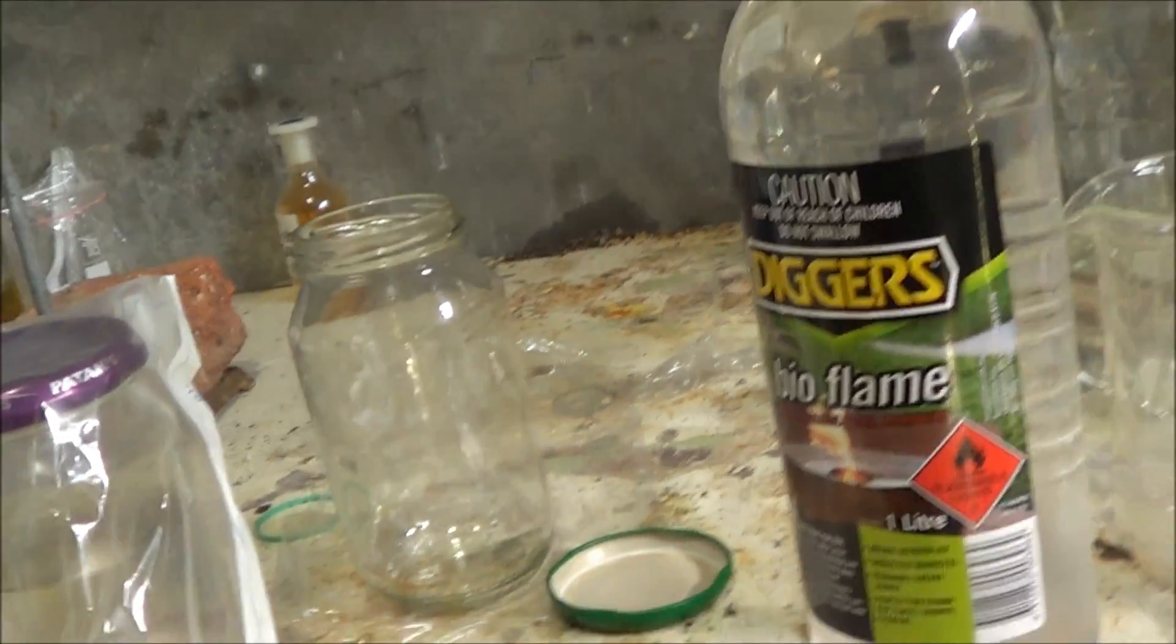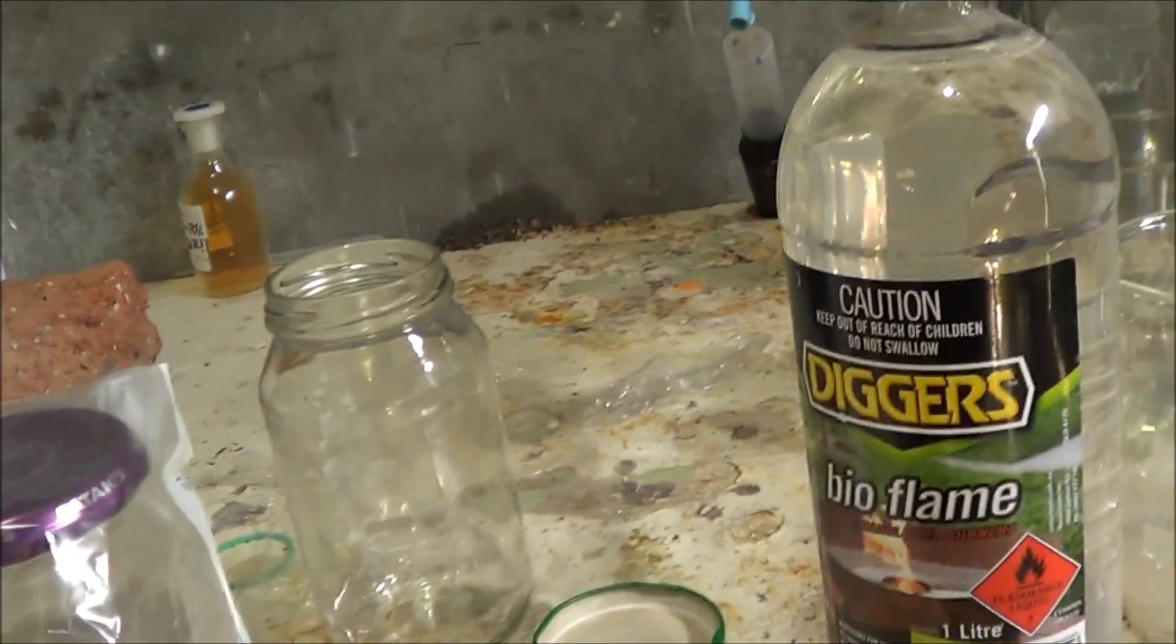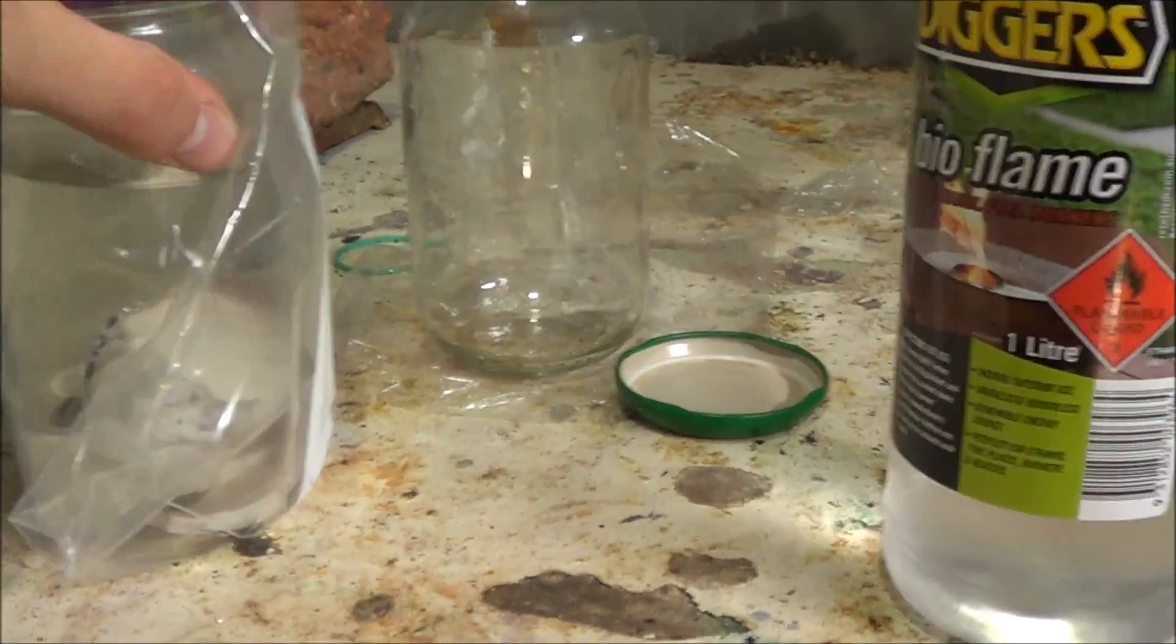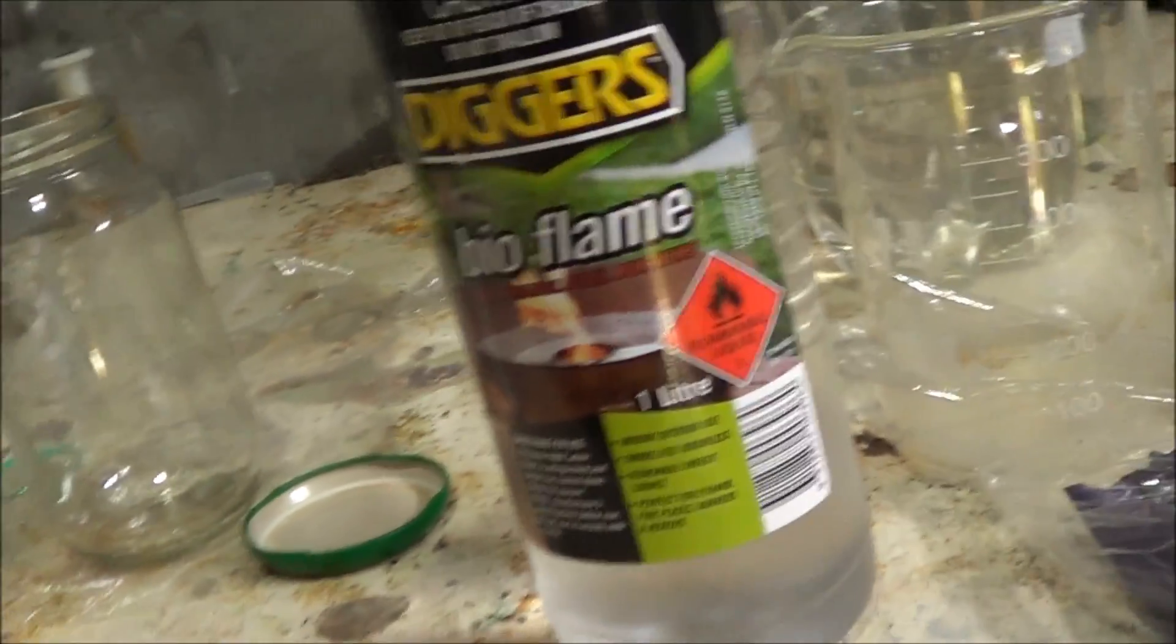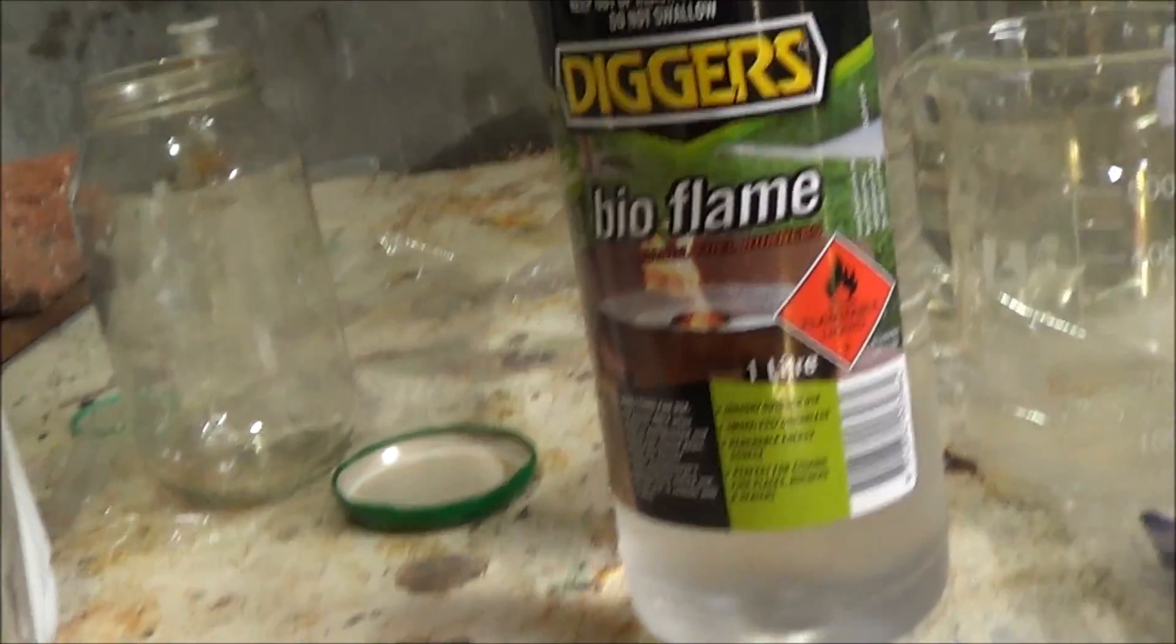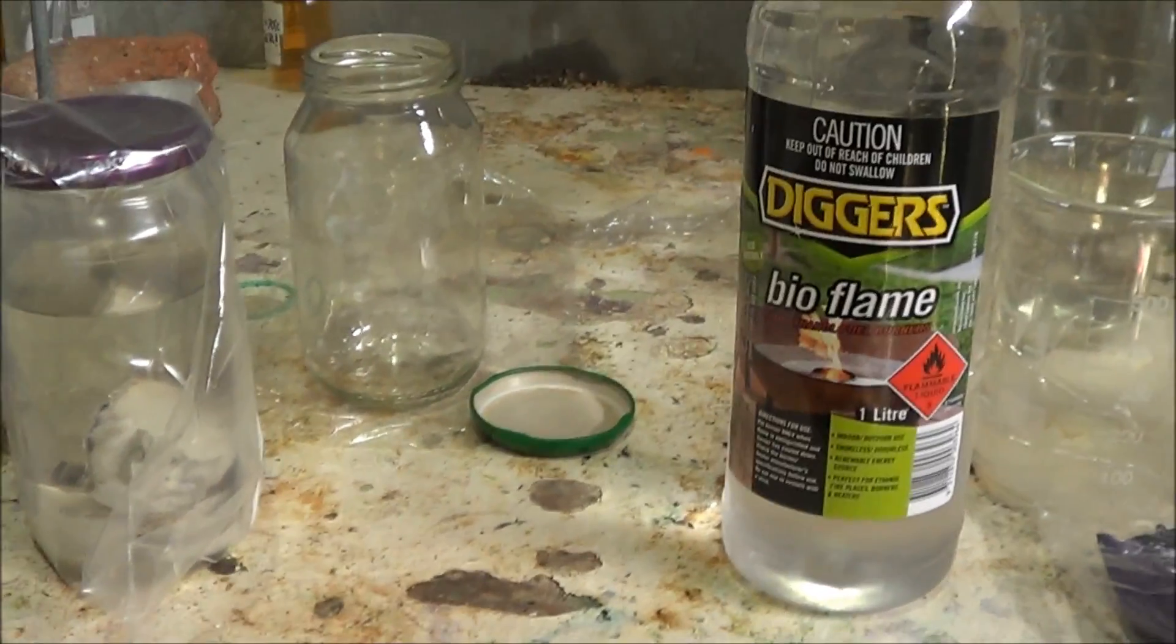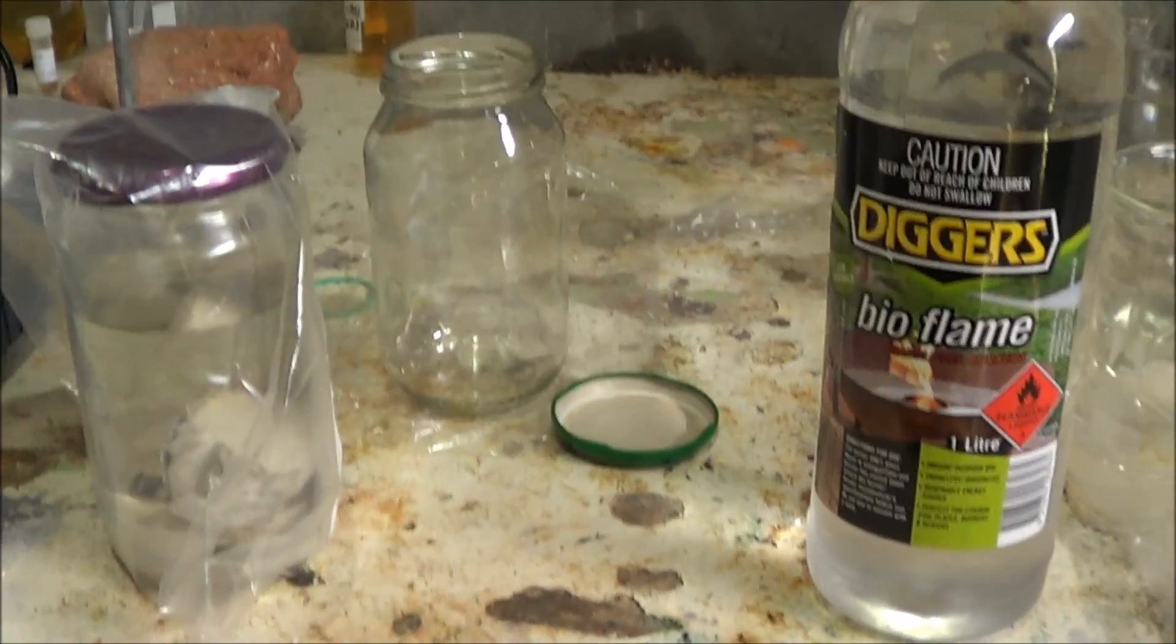So sodium metal will react with ethanol to form sodium ethoxide. Now, it will also react with water to form sodium hydroxide in the well known sodium reaction. Now, we don't really want sodium hydroxide in this mix because I feel like it will screw with things later on with nitromethane.